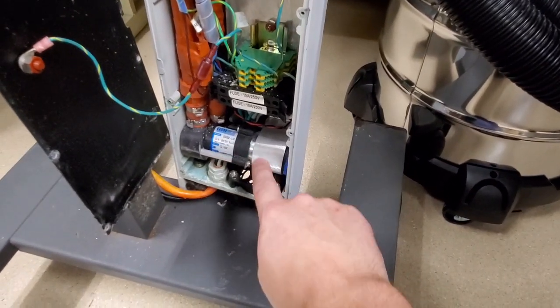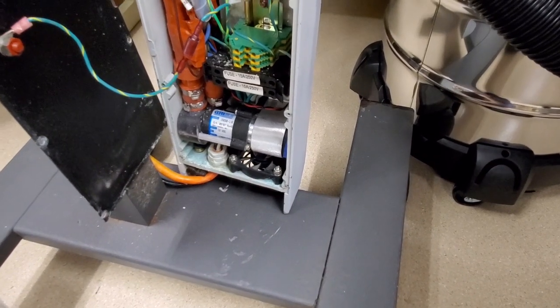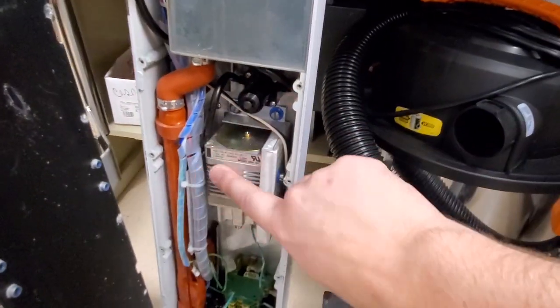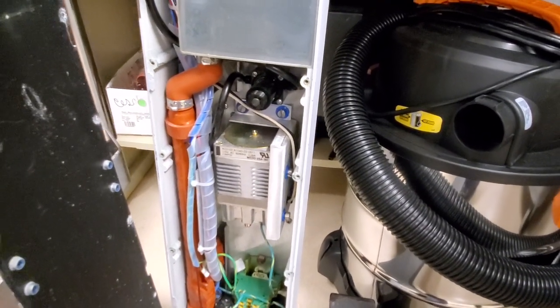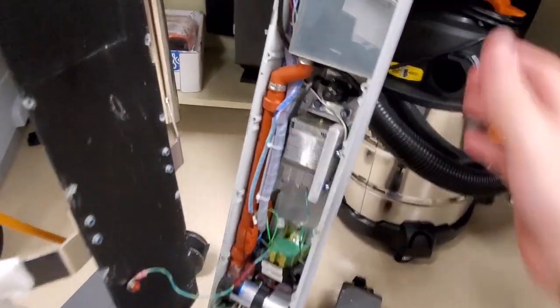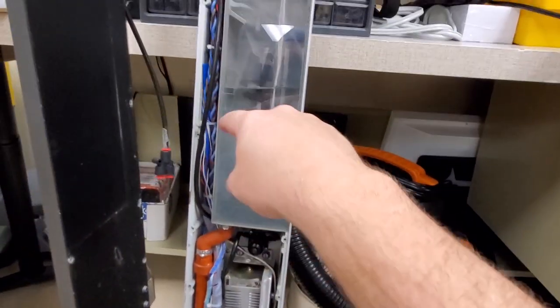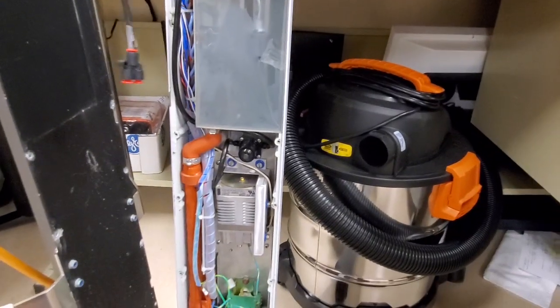Here I have a water pump. Notice we have a fan. So I always check the fan to make sure that the fan's not all gummed up. That helps keep your water pump nice and cool. Up here, we have the air pump. So that's going to be the other check for these machines: there is a 300 millimeters of mercury. And they labeled it. You see right there on the back of the unit. And that 300 millimeters of mercury is what goes up to the reservoirs so that you can pressurize the bags of saline or whatever.